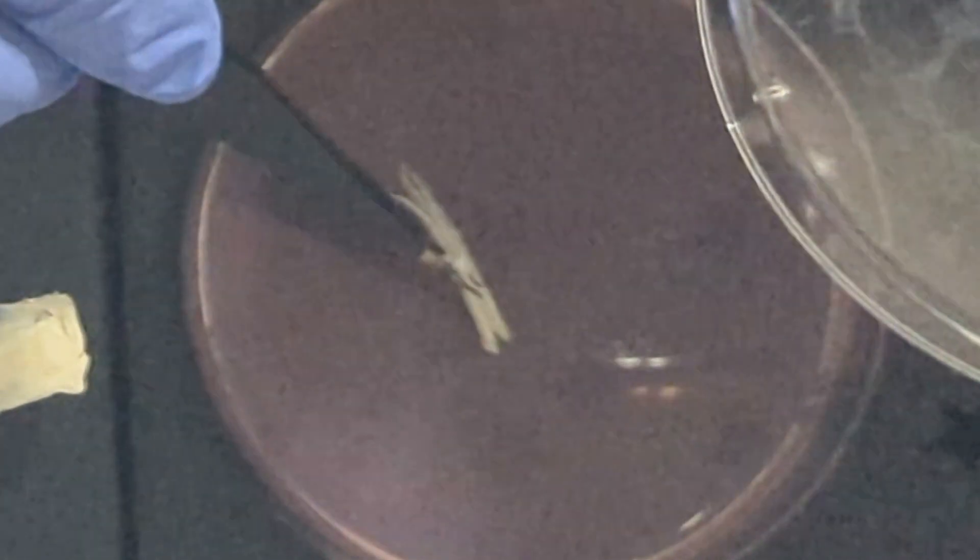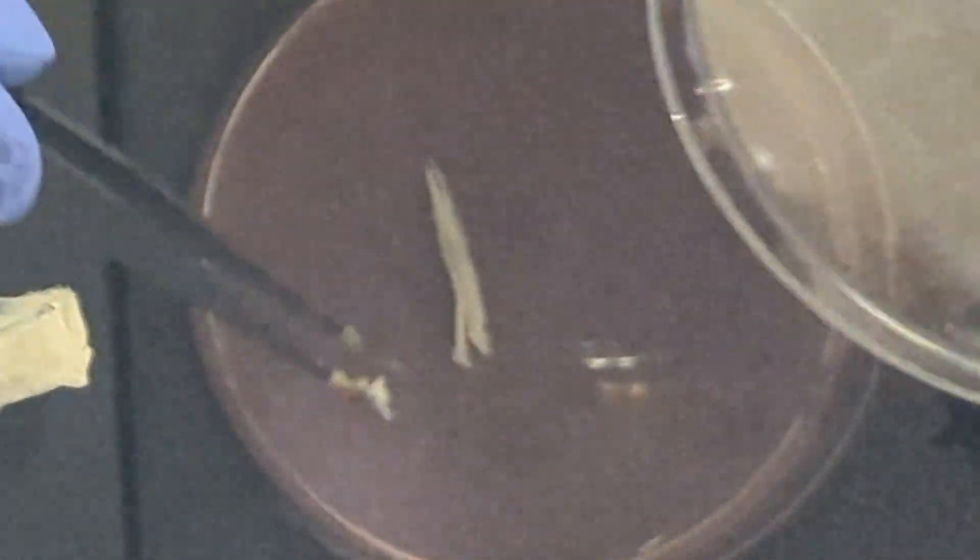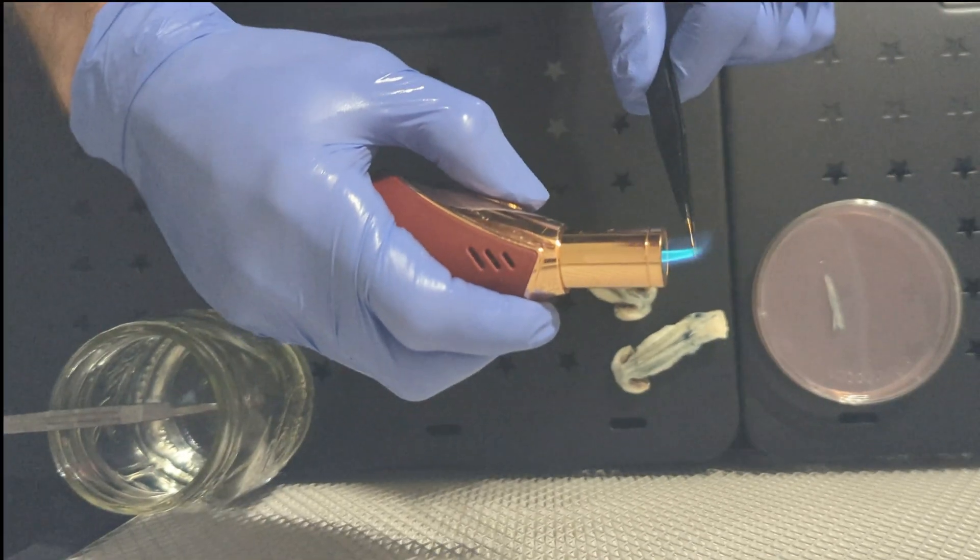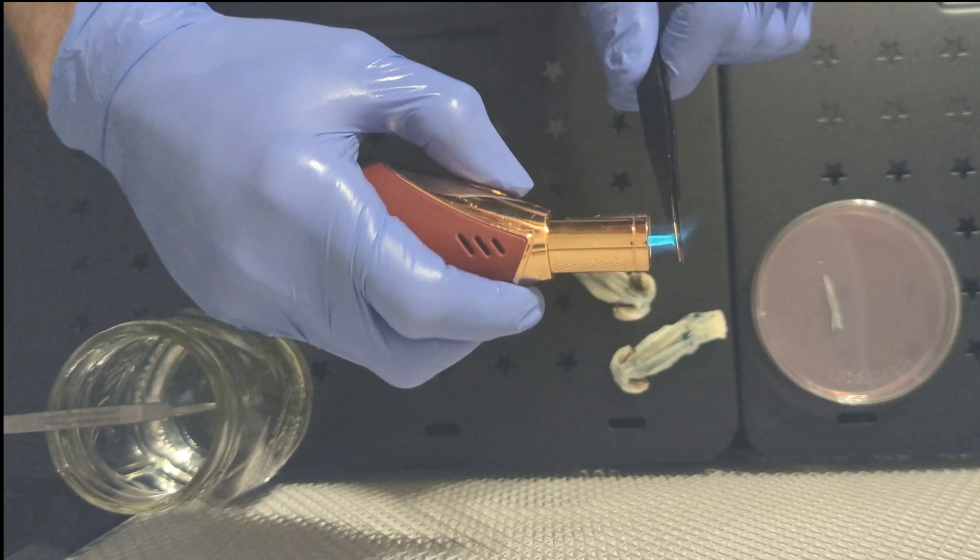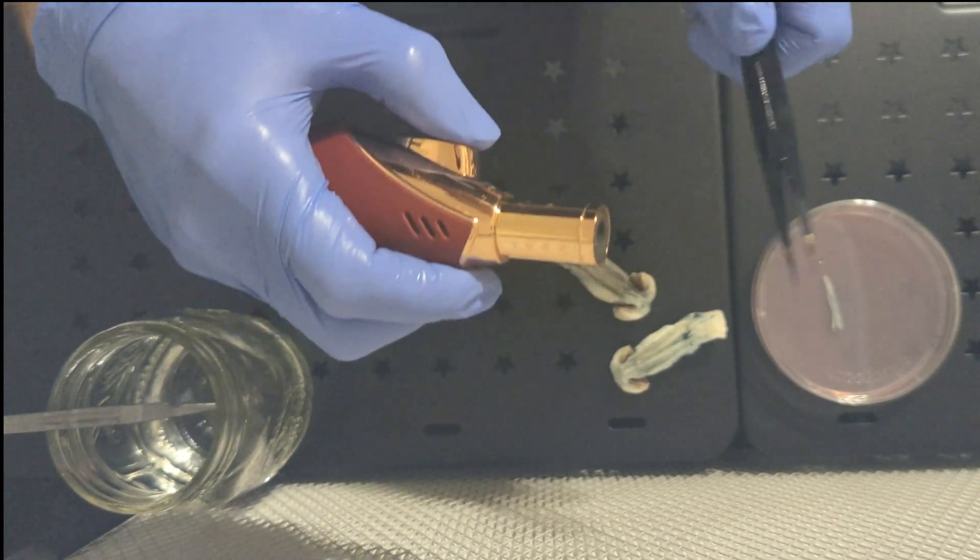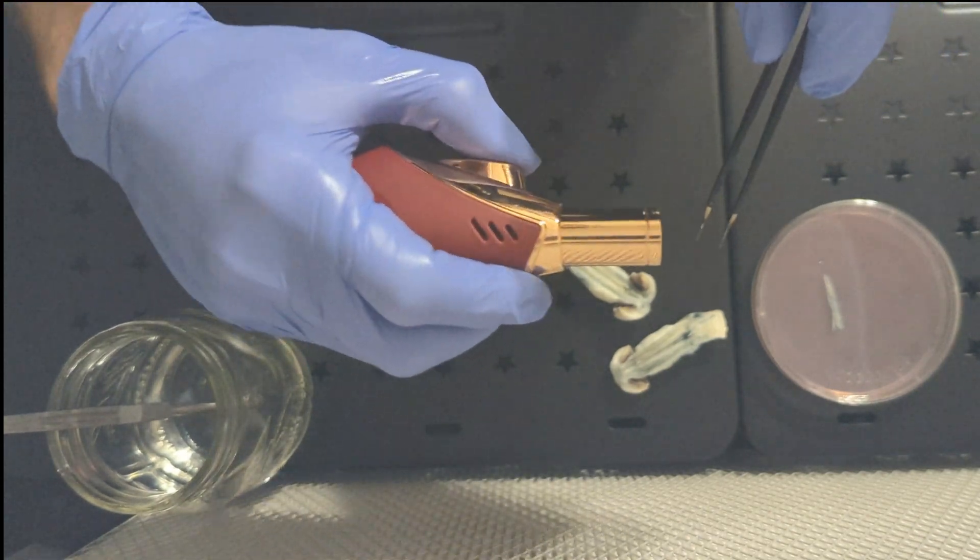Once you have the sample in the tweezers, you want to put it on the agar plate. You want to try and jam it into the agar or at least stick it to the agar so that it doesn't dry out. You're not necessarily trying to jam it underneath the agar, you're just trying to make sure that it's all in contact with the agar.